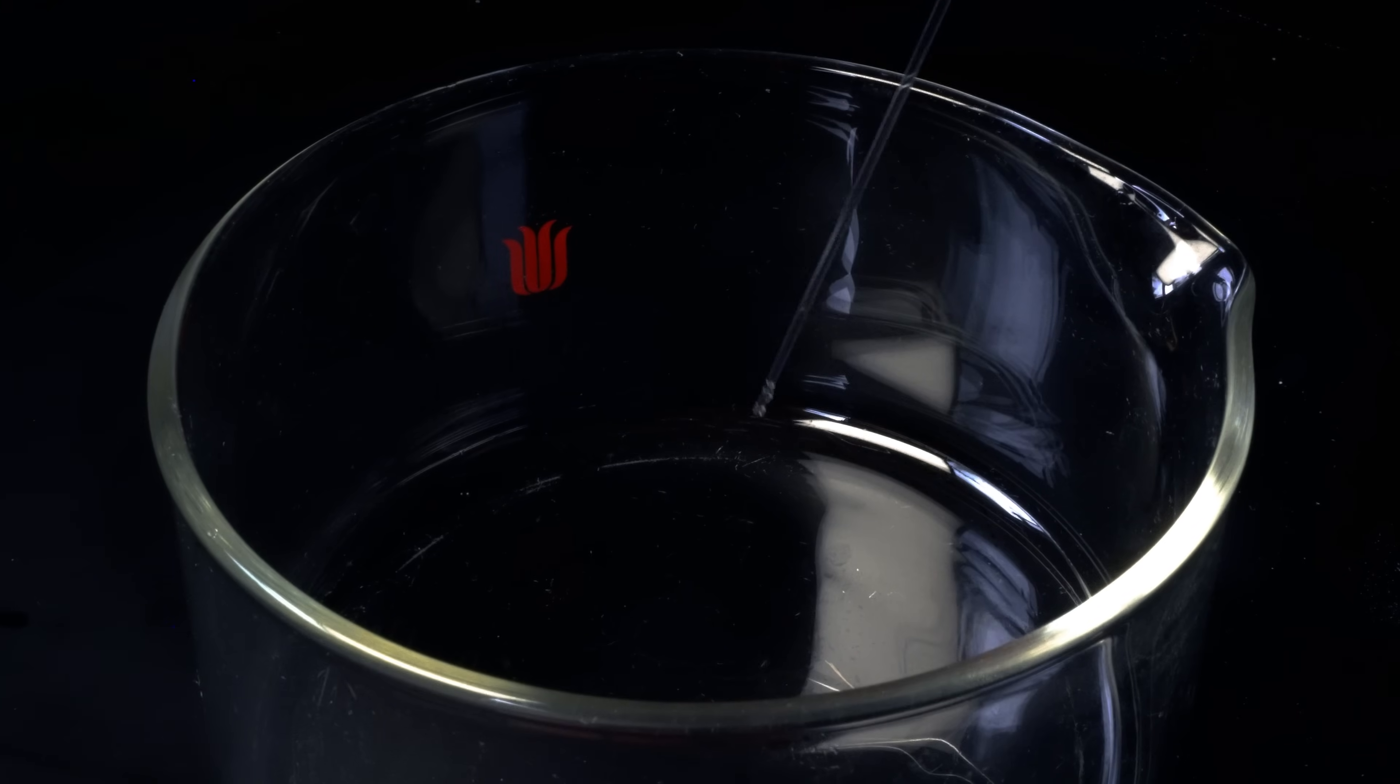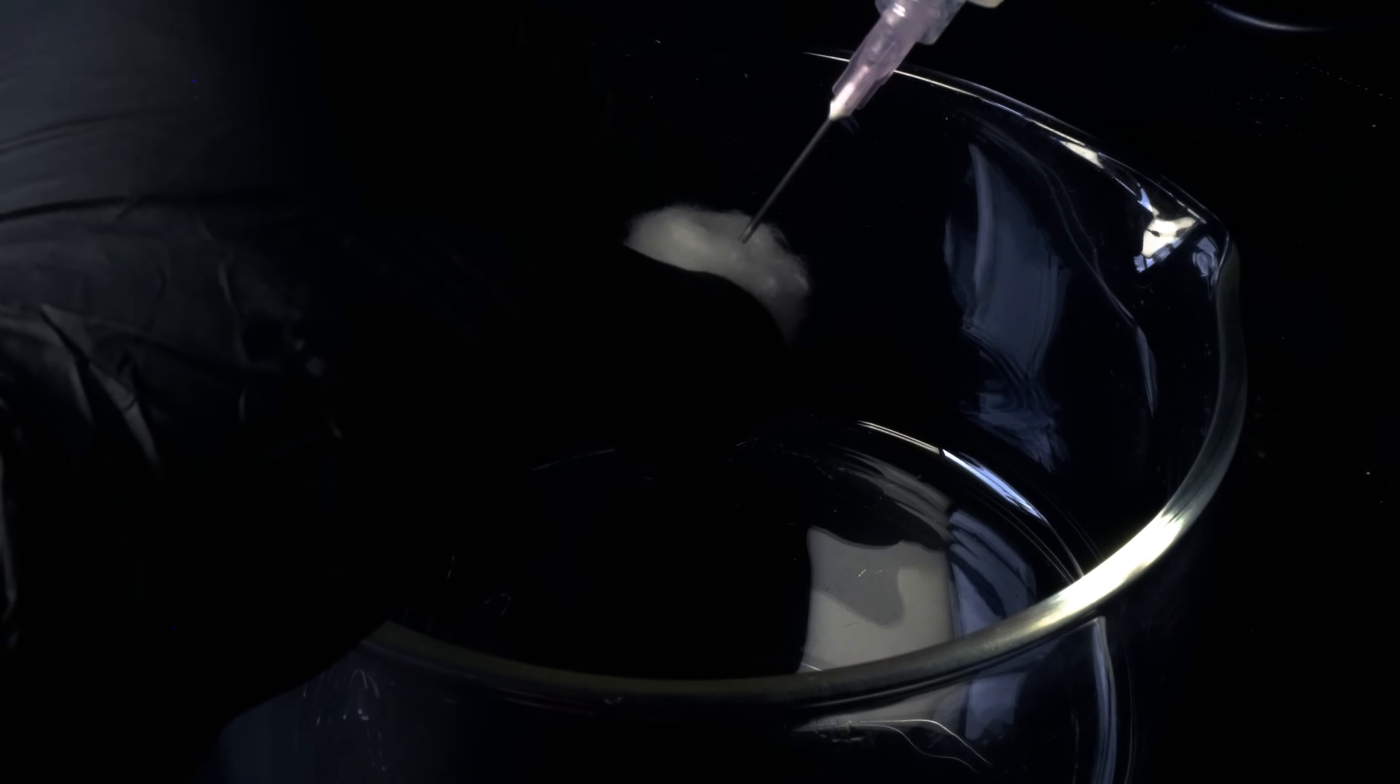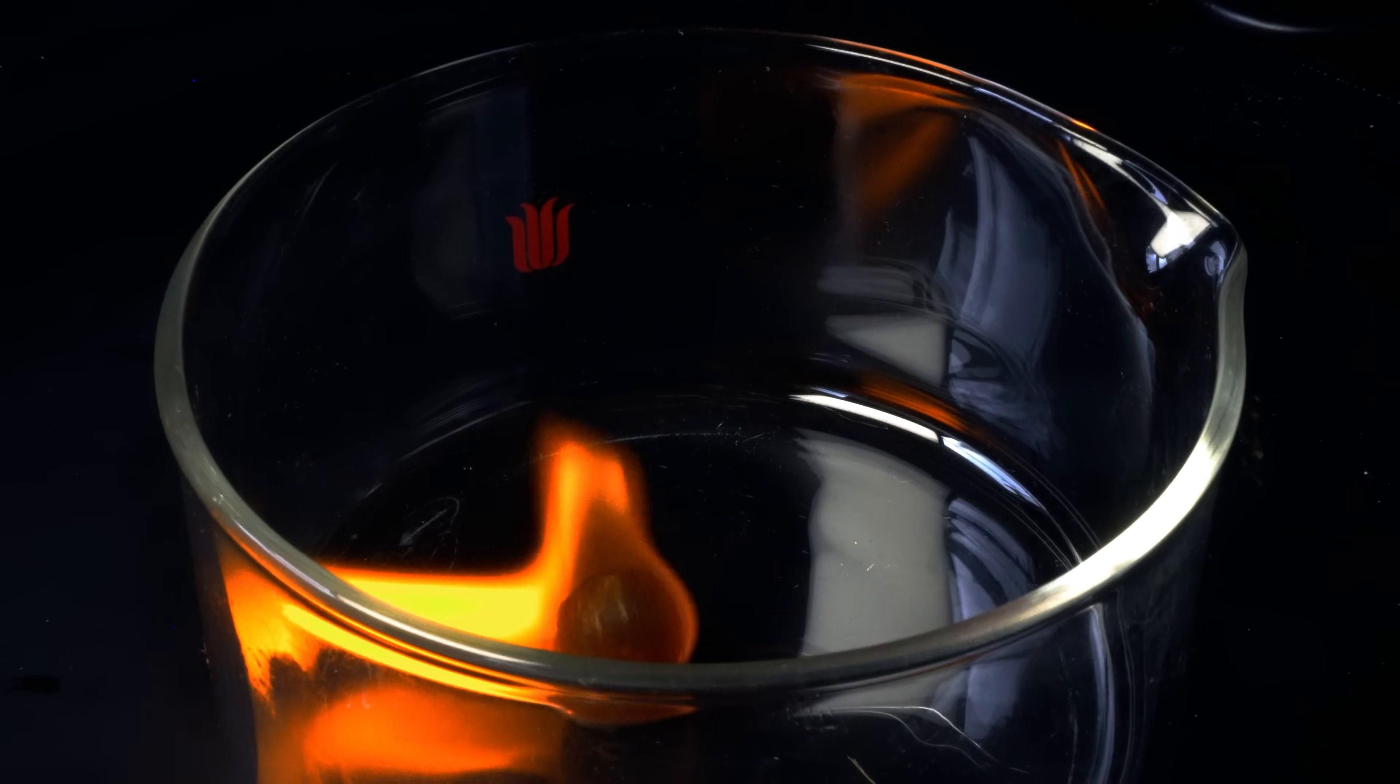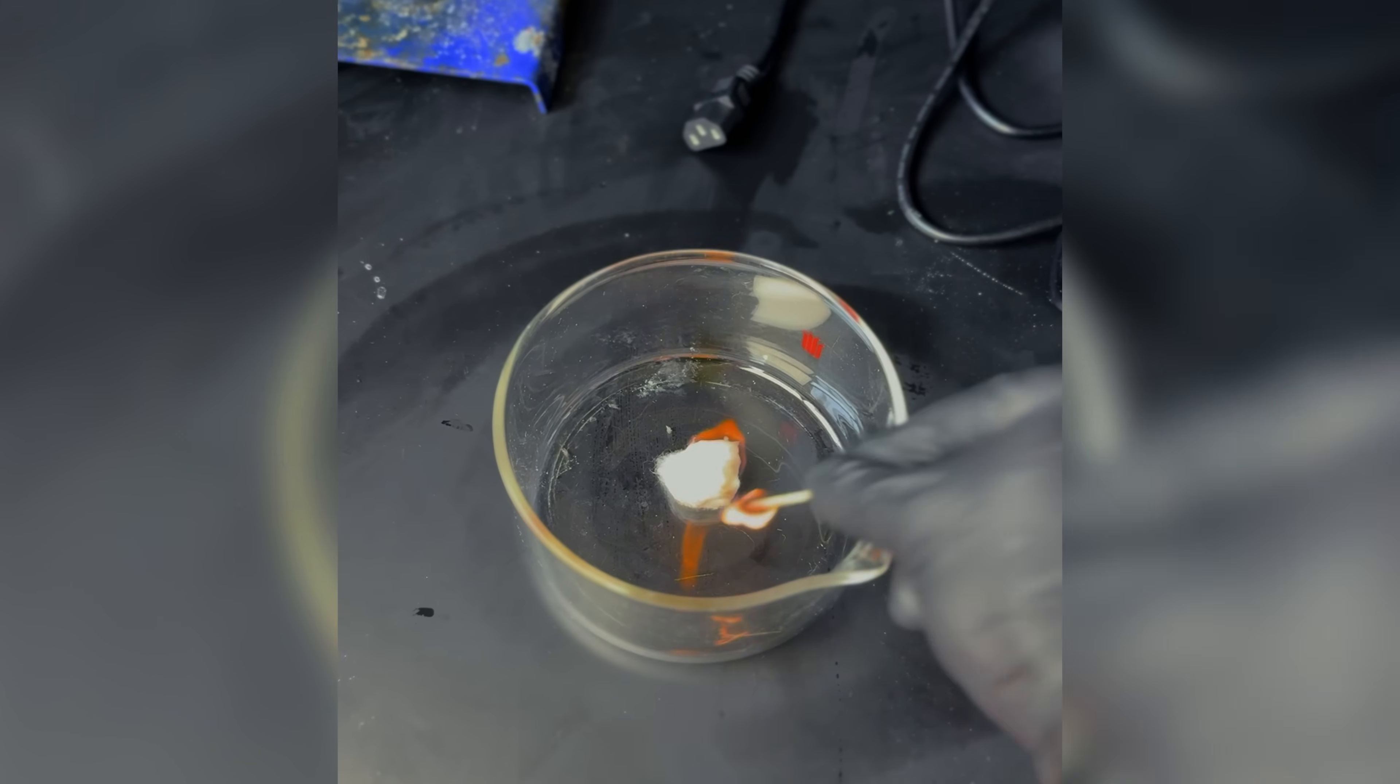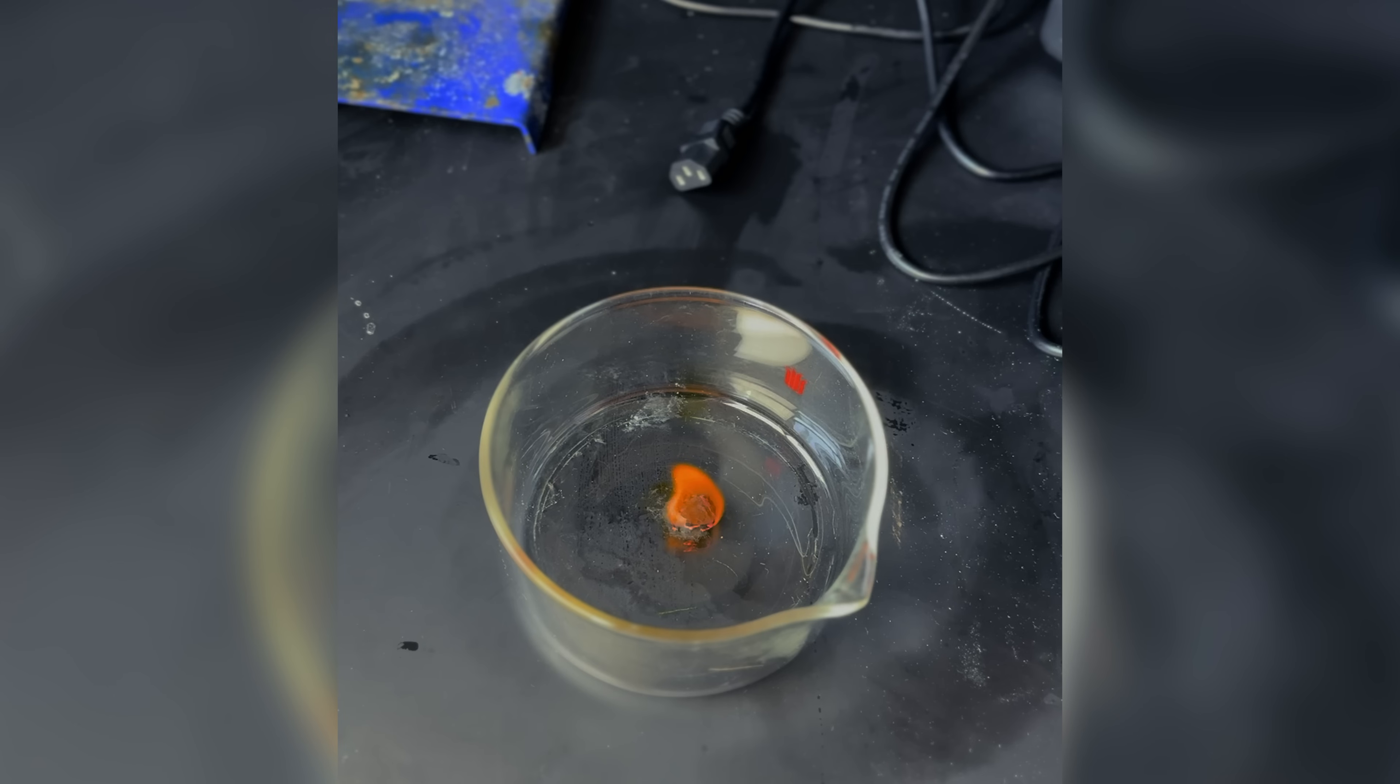I wanted to test how flammable nitroglycerin was, so I put a little bit on a recrystallization dish. I then used a propane torch, and it kind of caught on fire, but it really just kind of pushed it around. So what I decided to do was inject it into a cotton ball and see what the burn rate is. I thought it would be pretty cool, so I ejected a little bit and I caught it on fire. It almost looked like a jet engine on the side of it, which I thought was unique, and that was exactly where I injected it. My microphone wasn't working so you can't hear the sound, so I recorded on my phone and I did a little different this time. It burned really cool, and it also reminded me of Fire Force a little bit.